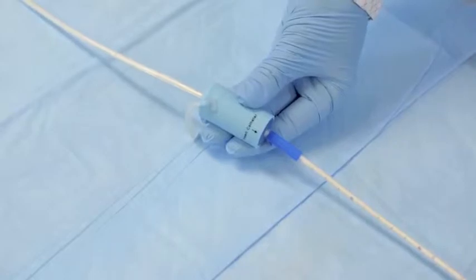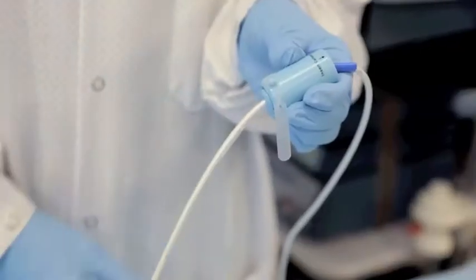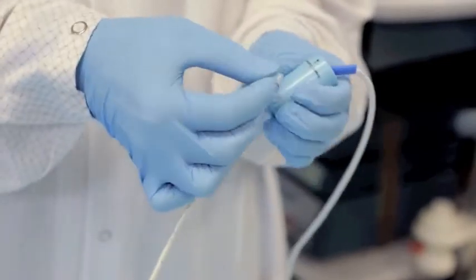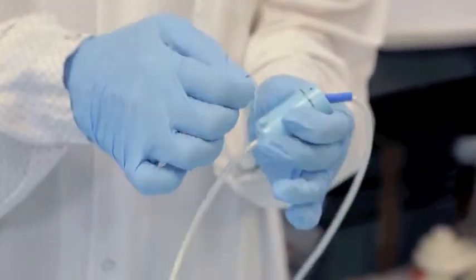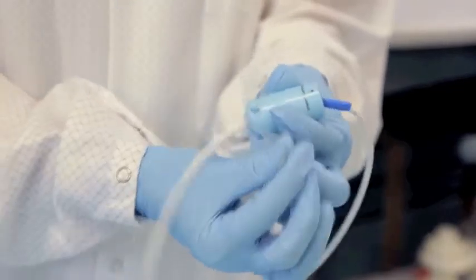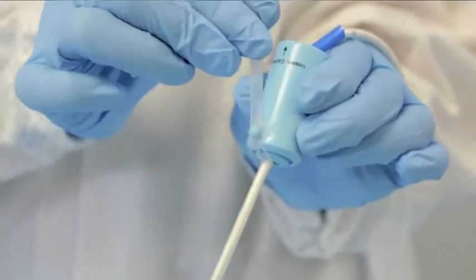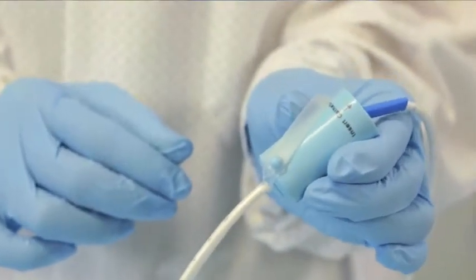If the slider passes the blue cuff, the sheath and slider must be removed and reapplied. Holding the slider, grasp and stretch the silicone tab and wrap it three times around the catheter at the bottom of the slider. Secure the silicone tab to the slider by inserting the hole in the tab over the peg or button on the slider.